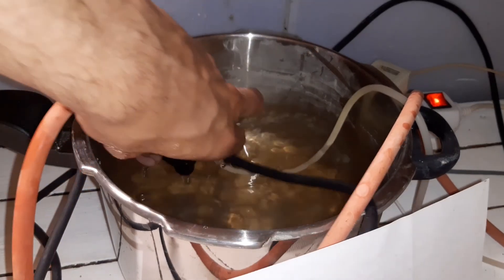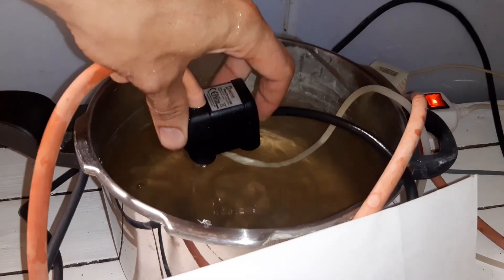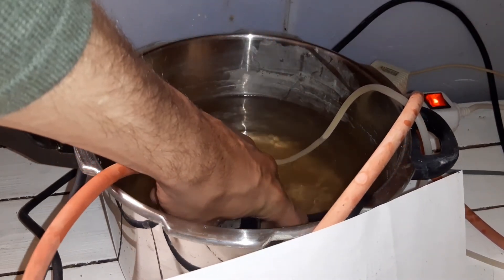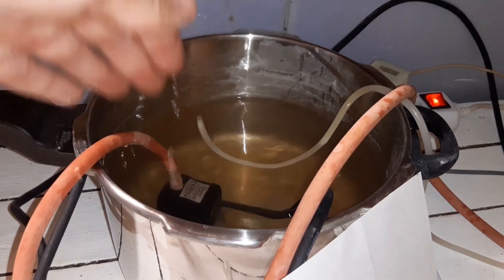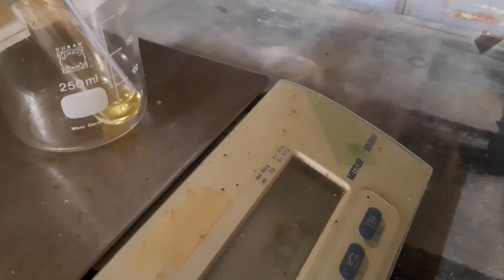It's very suitable for small-scale distillations such as this one. The yield is around 3.9 grams, and I'll have to calculate how much that is theoretically. My starting material was about 10 grams of ammonium nitrate and 15 grams of sodium bisulfate, both probably still a bit wet.